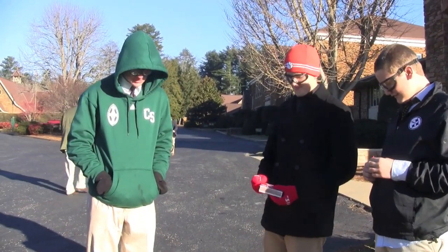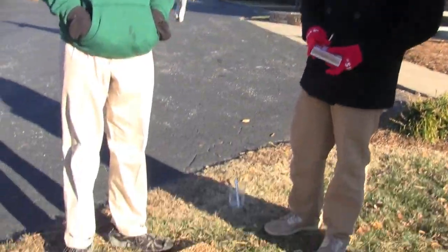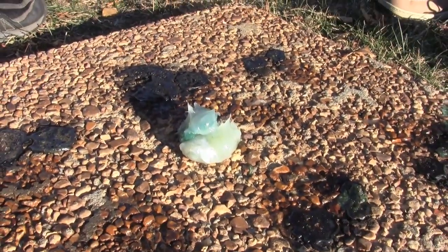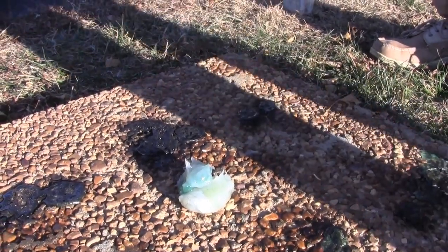Favorite bits of our napalm — the polystyrene plus gasoline, extruded polystyrene plus gasoline, and Vaseline plus gasoline. We're just taking the leftovers and mixing them together. This is 56 grams total of napalm — that's a decent amount. The largest of the other samples we did was seven grams, so this should be interesting.